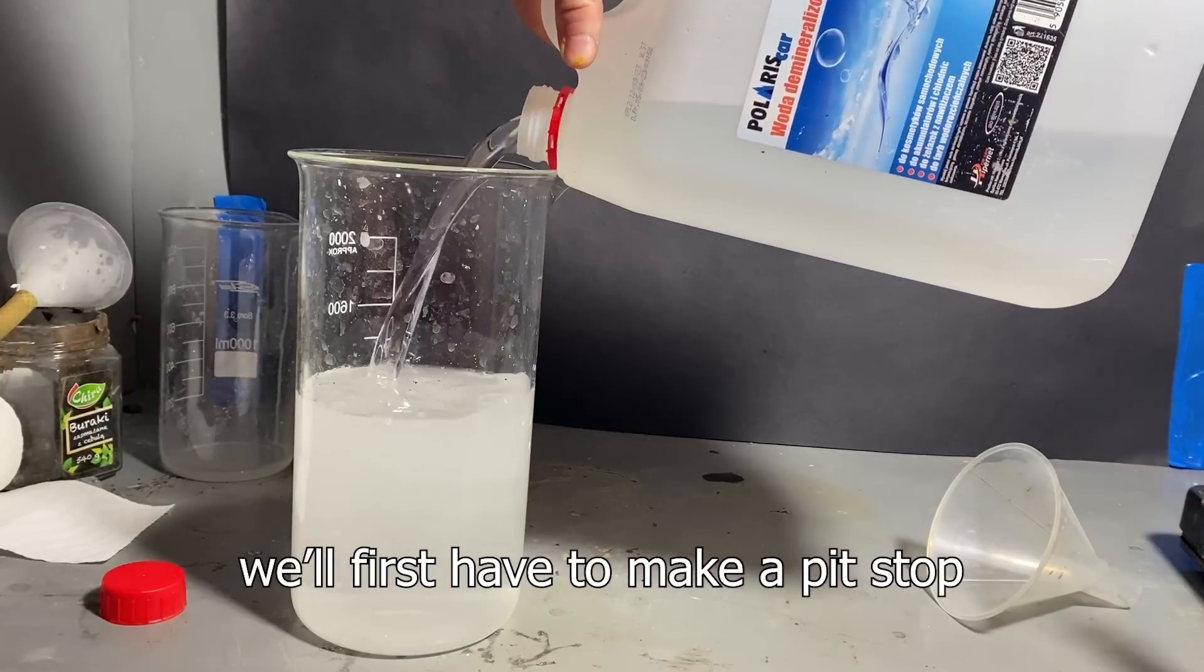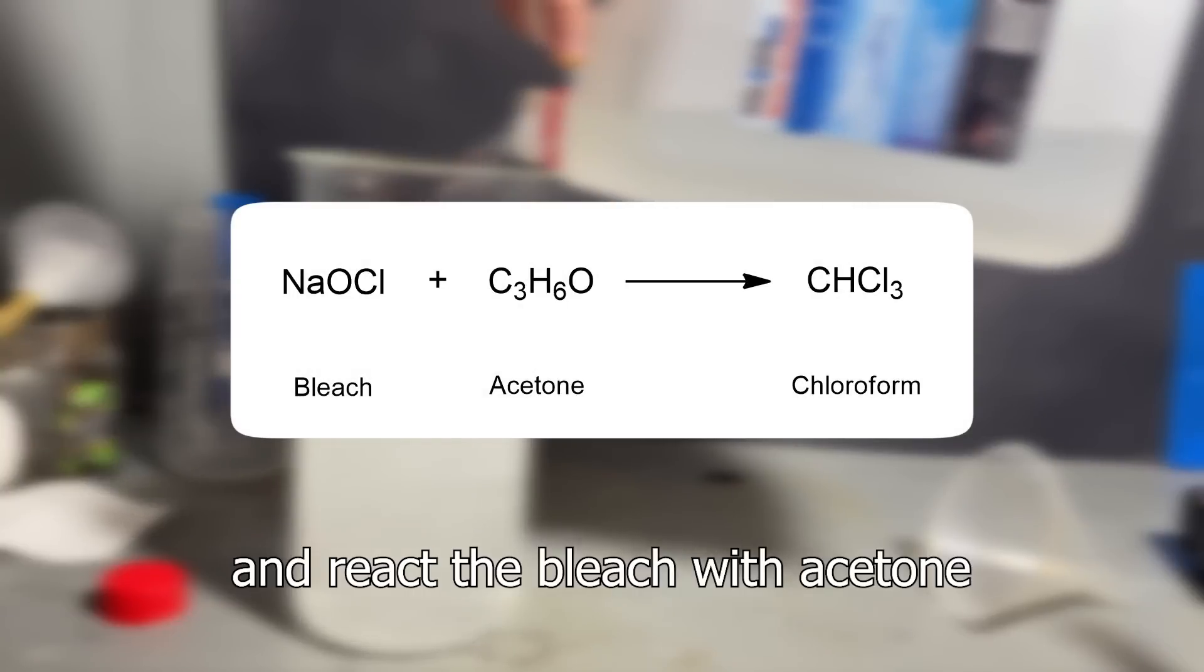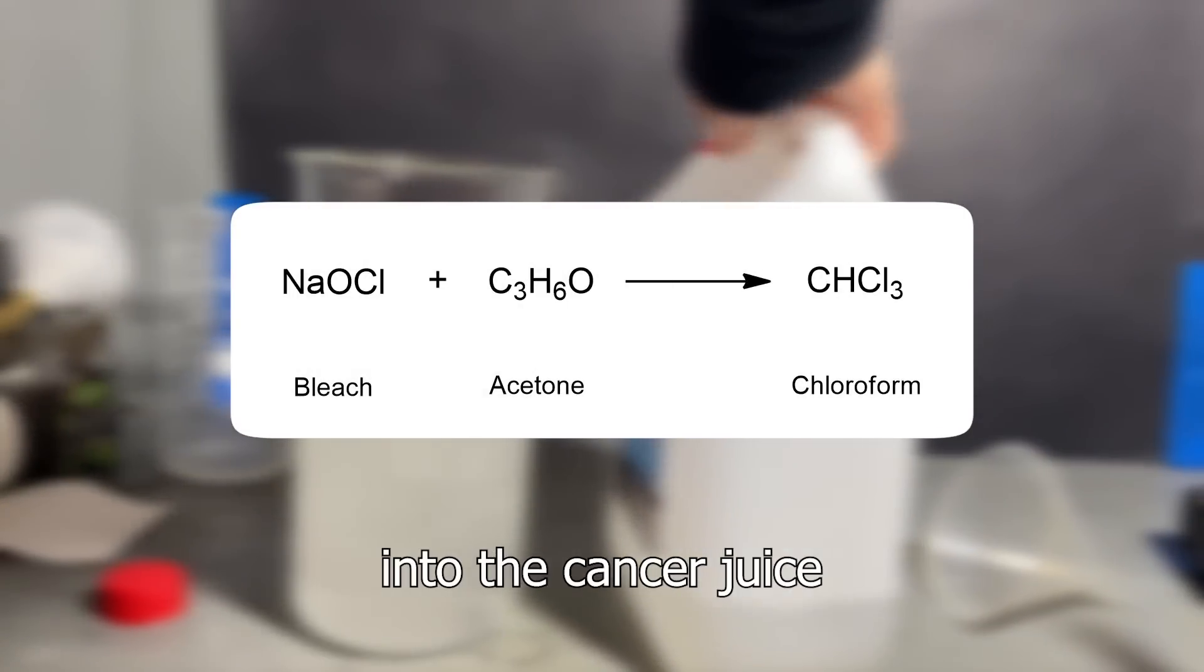To turn bleach into carbon tet, we first have to make a pit stop and react the bleach with acetone to make chloroform, which we can then process further into the cancer juice.